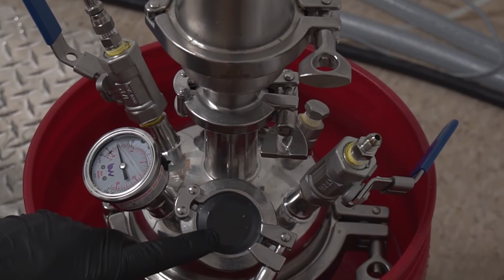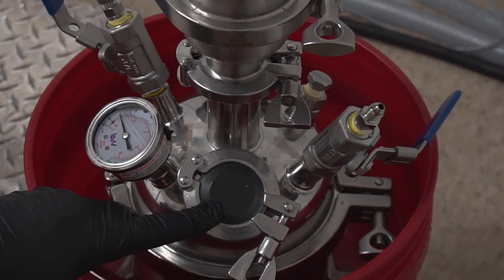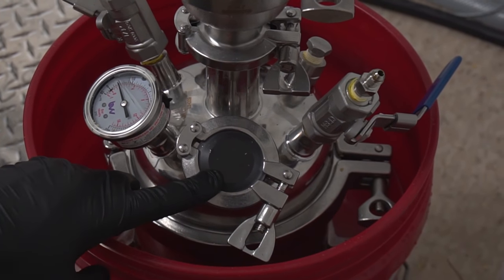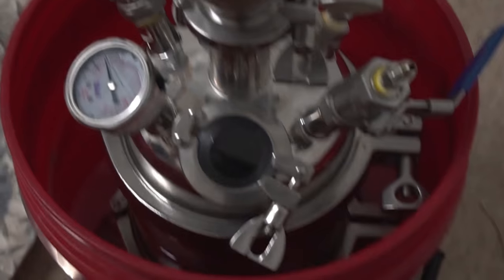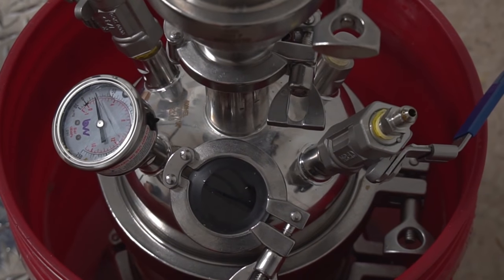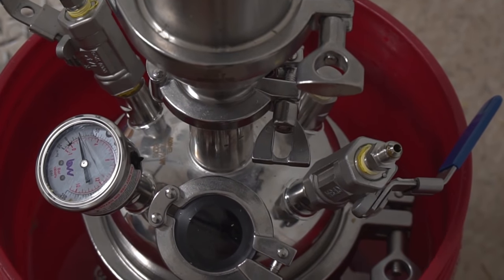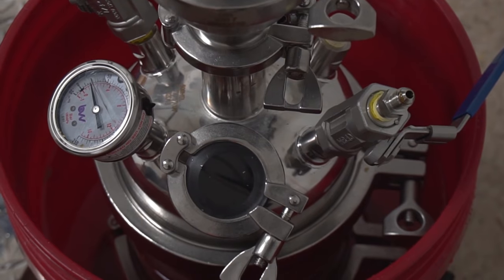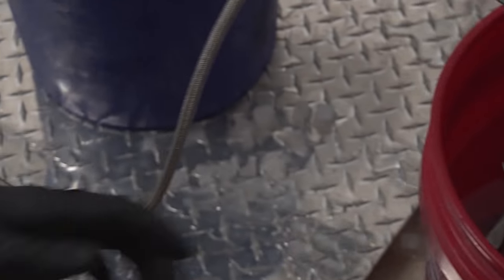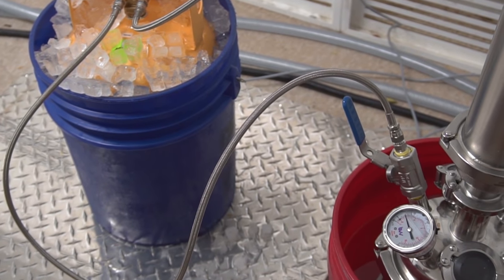We can use metaglass sights as well. That'll also allow for higher pressure. These are polycarbonate currently. We're only about 30 PSI, so it's not a large PSI. We also have recovery pumps such as a C-MEP. This will take right in the middle of this line here. It will pull from the base and push into the collection. This will speed up your recovery as well.